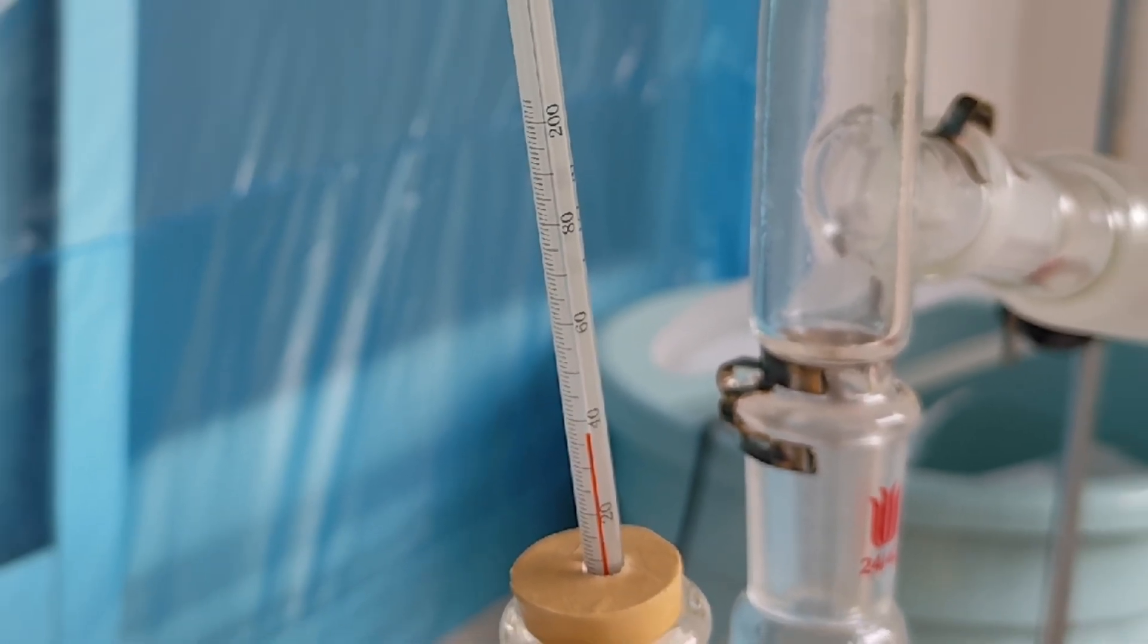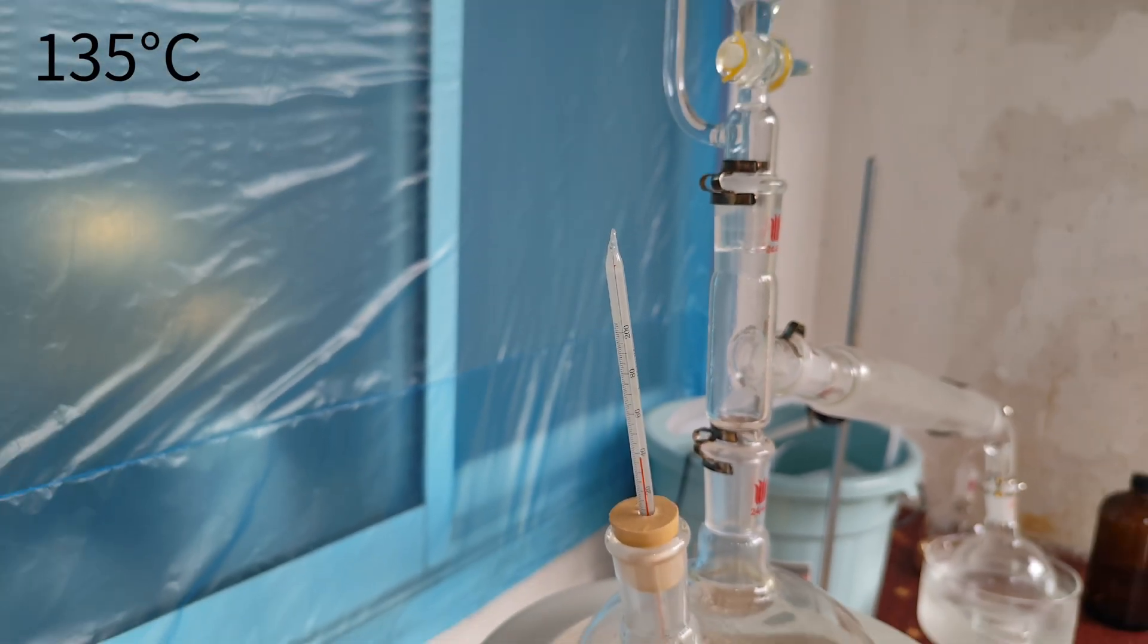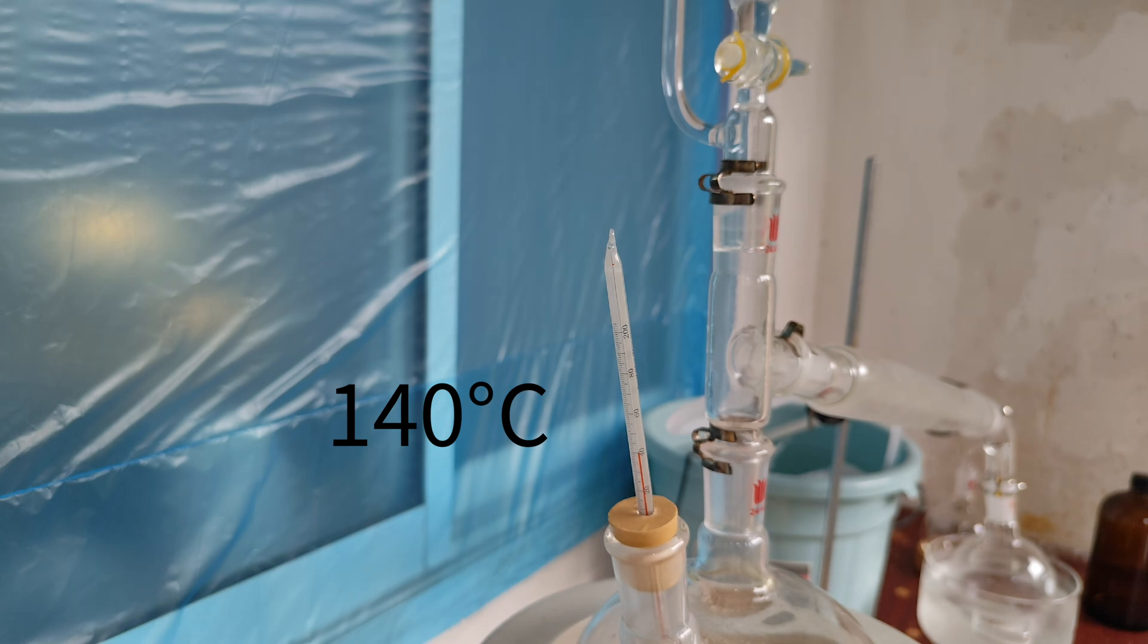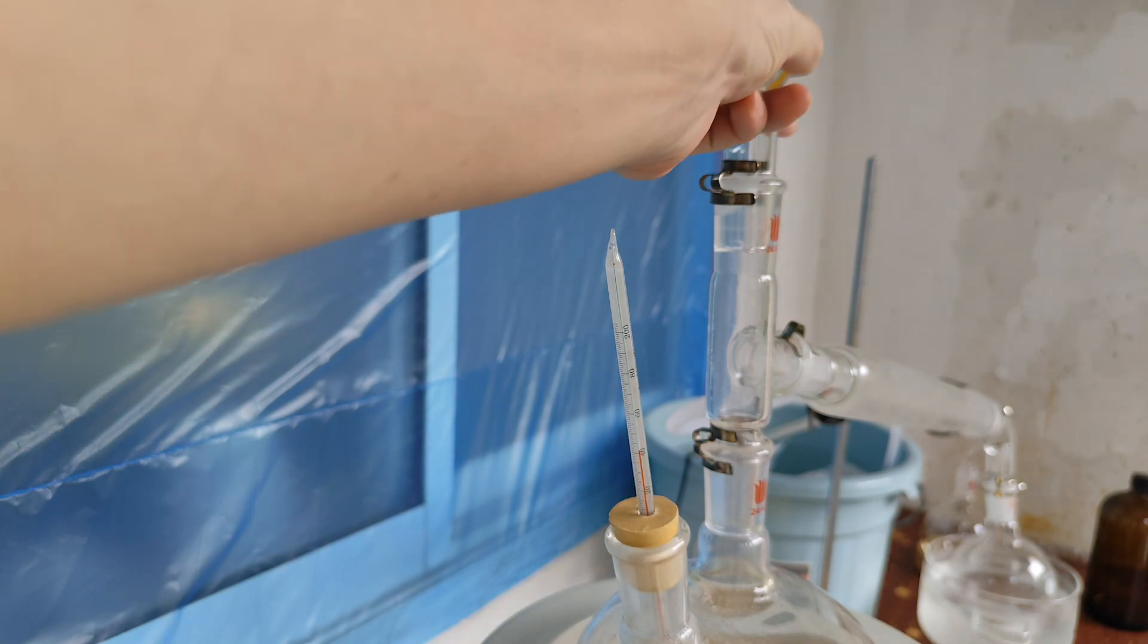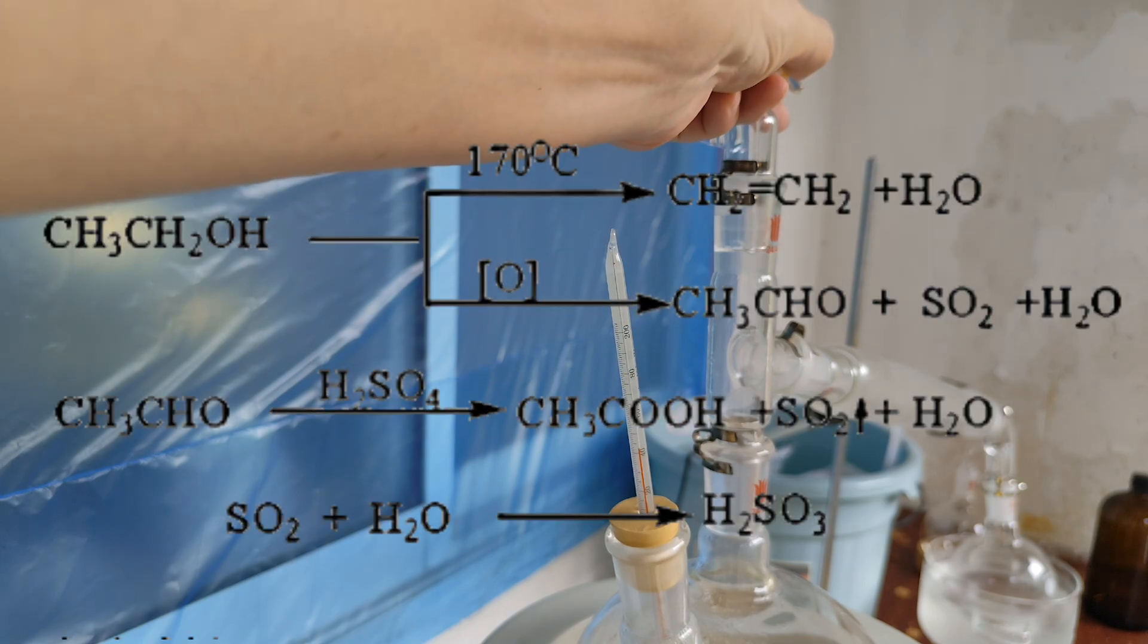The most suitable temperature of the reaction is from 135 to 145 degrees, so I must keep attention on the thermometer. Once the temperature is near 140, I should turn on the stopcock of the dropping funnel to add the alcohol slowly and lower the power of the heater to ensure that it will not produce too much side products.